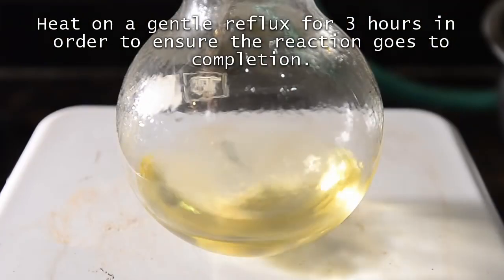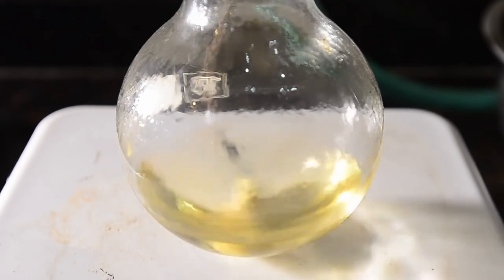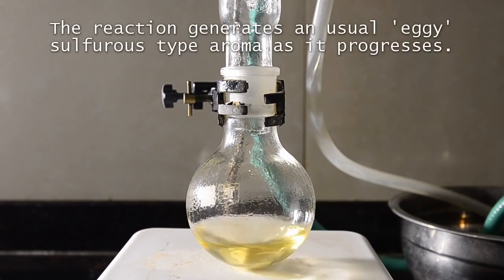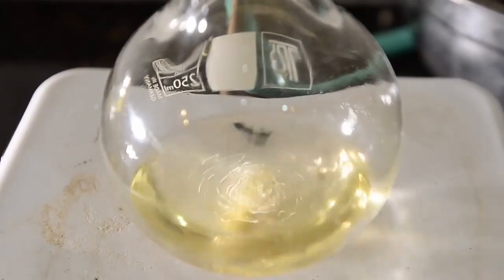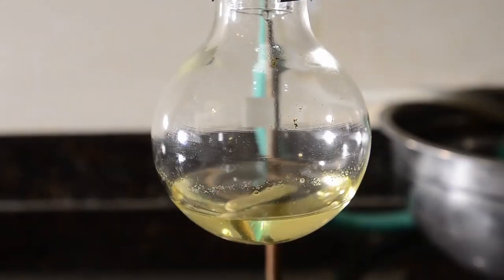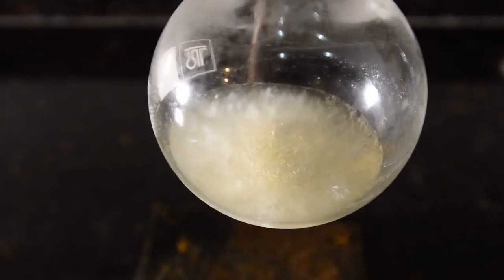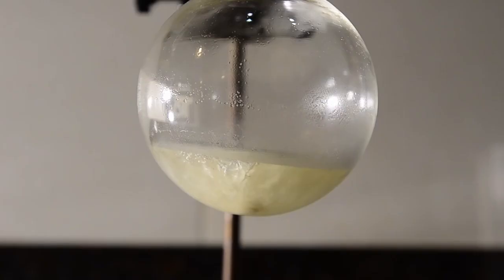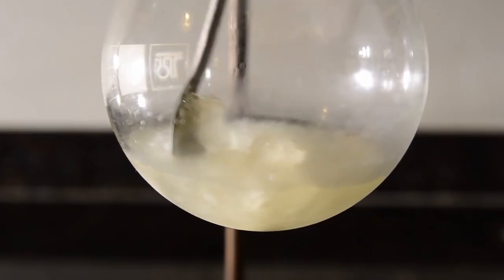Over 3 hours not a lot happened, but there was a strange sulfurous eggy-type aroma coming from the condenser. The reaction mixture became a slightly more pale yellow. Here we are after 3 hours. At this point we took the flask off the heat and allowed it to cool before dismantling the apparatus. As the flask cooled down the contents solidified into a crystalline mass as you can see. This was fairly easy to break up however using a spatula.